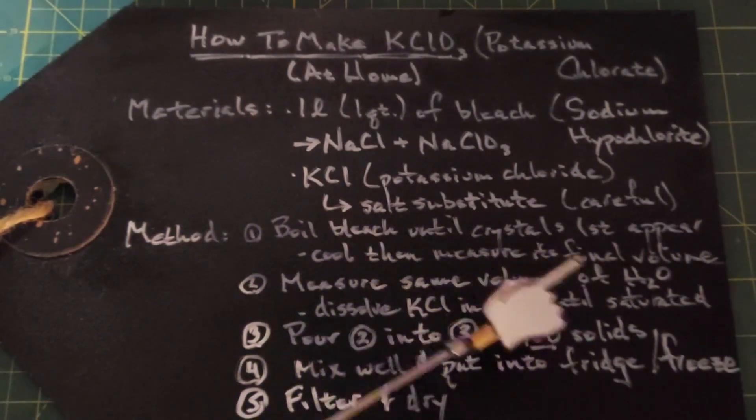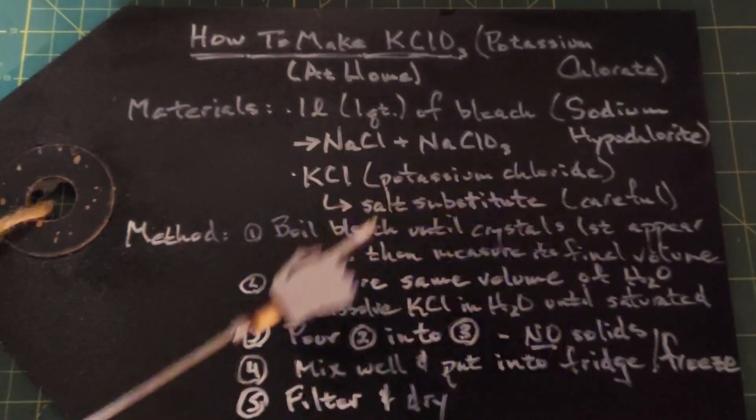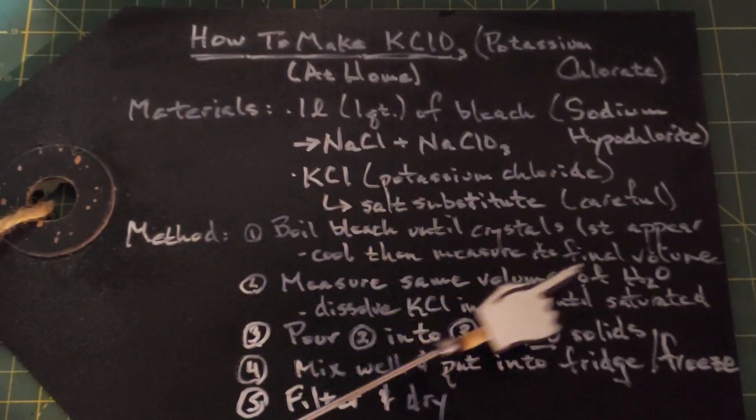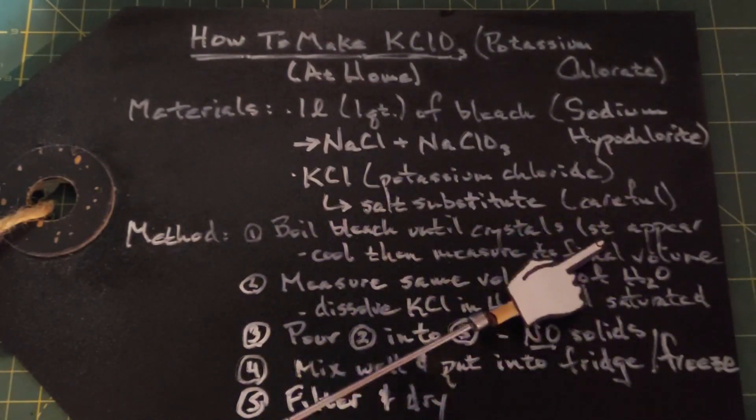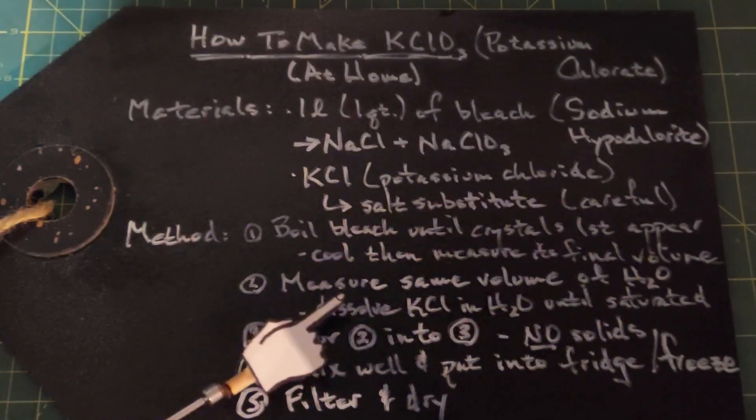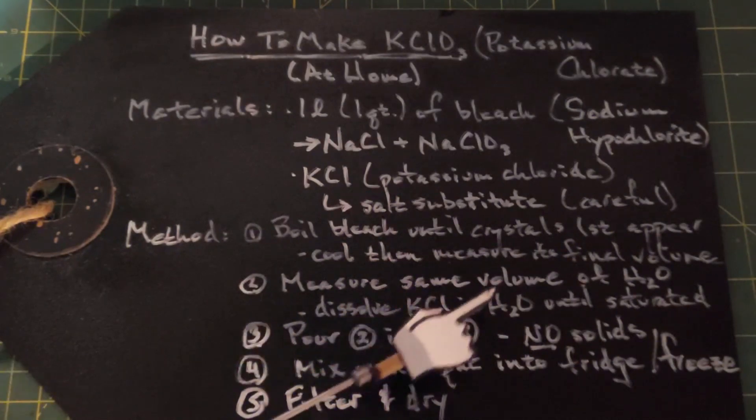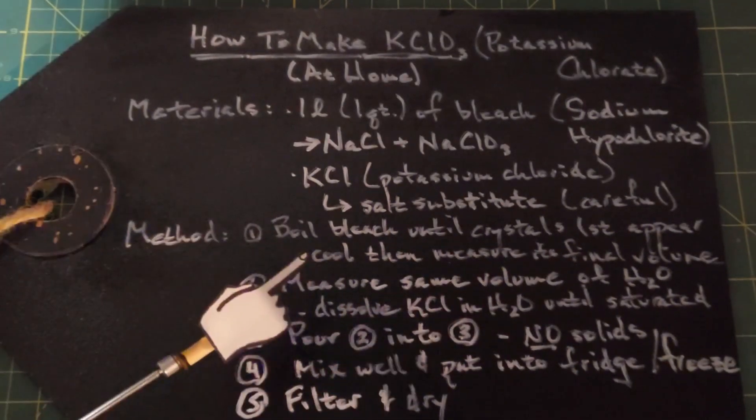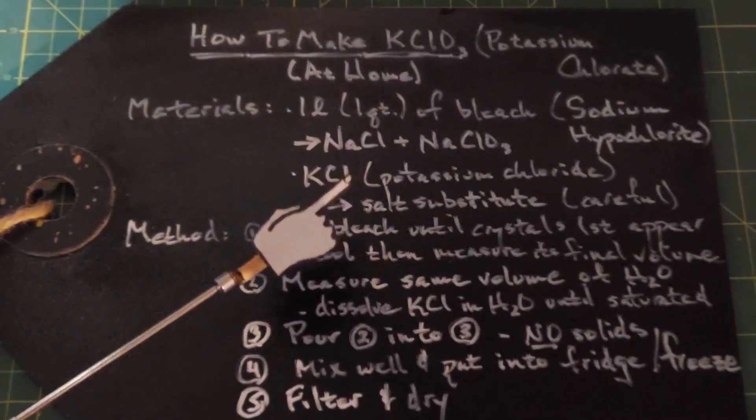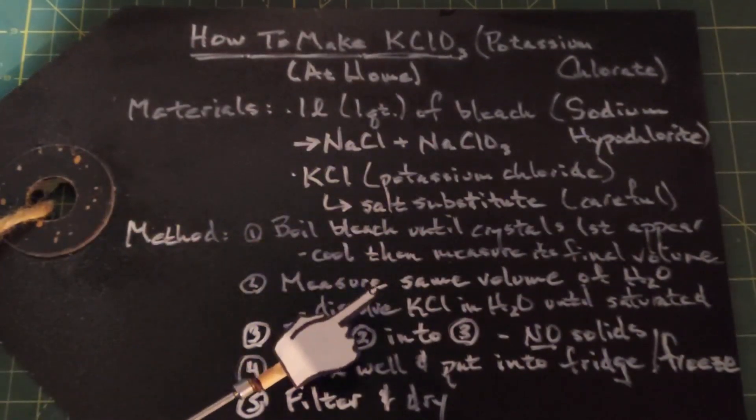Then measure the final volume you have. Then measure the same volume of water as you had in the boiled down bleach, and you want to add the potassium chloride to that water until it's saturated. At this point you have two liquids, one is the boiled down bleach and the other one is potassium chloride and water, and they're the same volume.